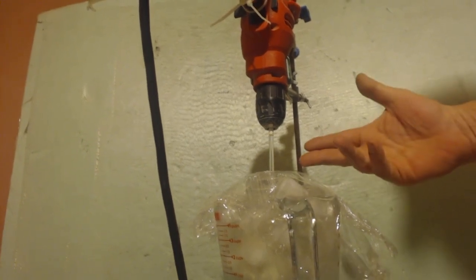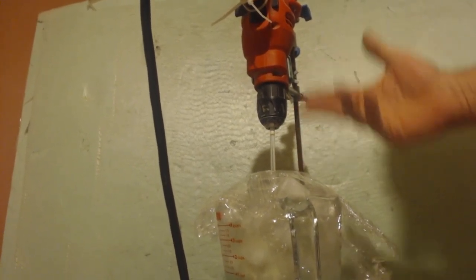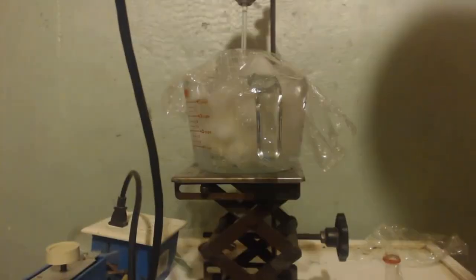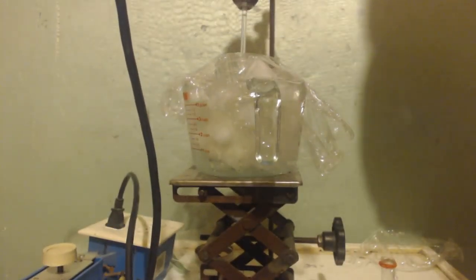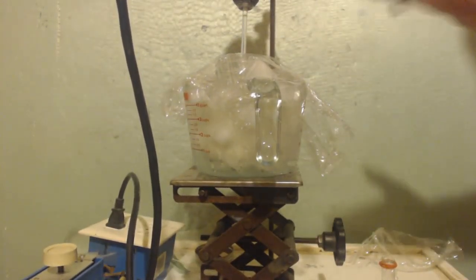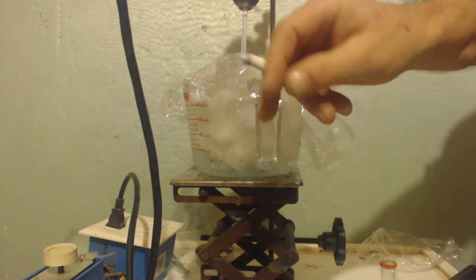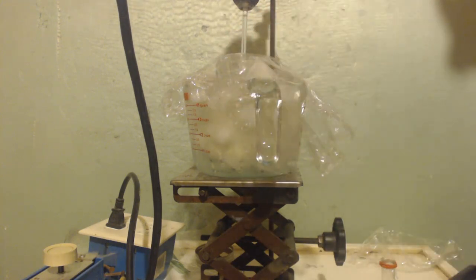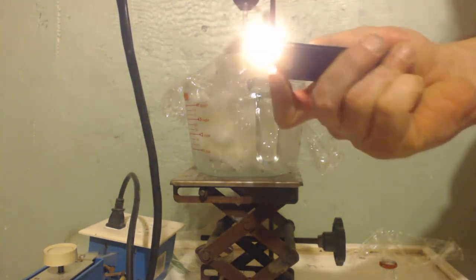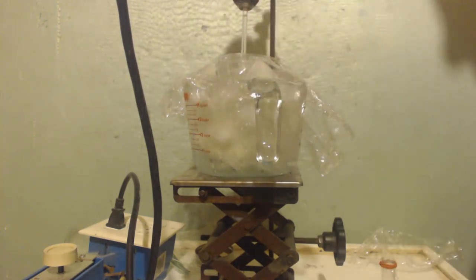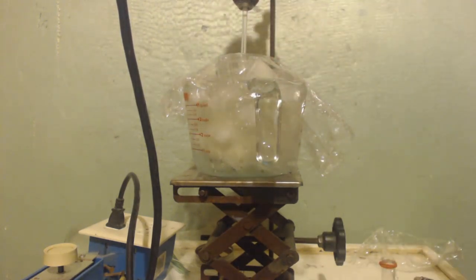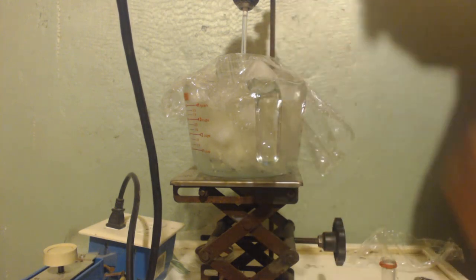But you cannot do this. This is bad because you will have vapors coming up, heating the sparks you're making. Don't smoke, no smoke, no lighter, nothing like that. You will, whatever. So anyways, I'll go back to stirring this some more.